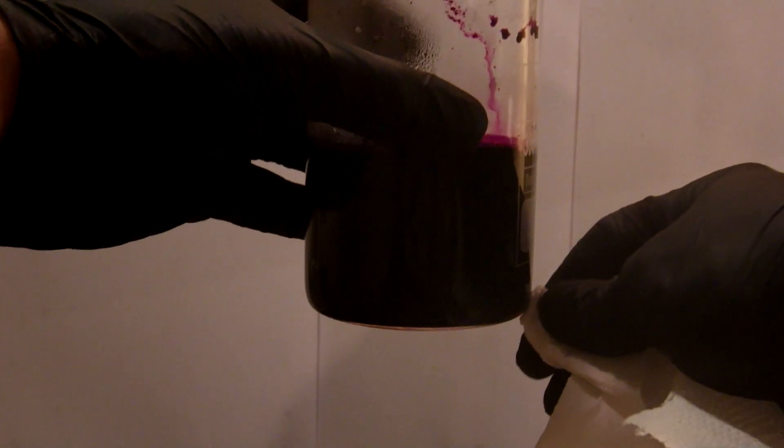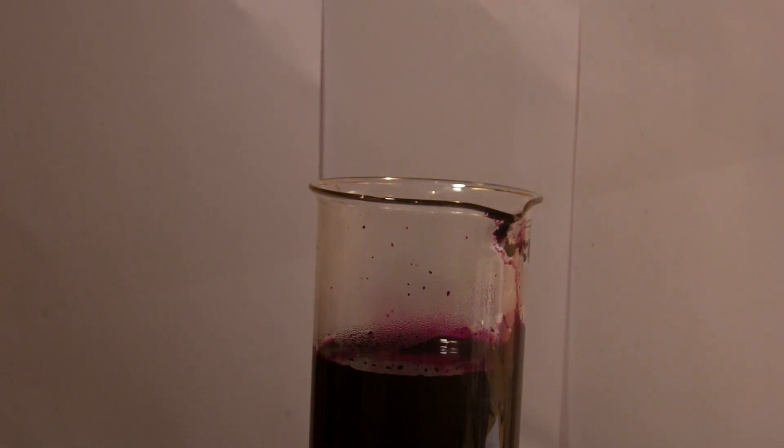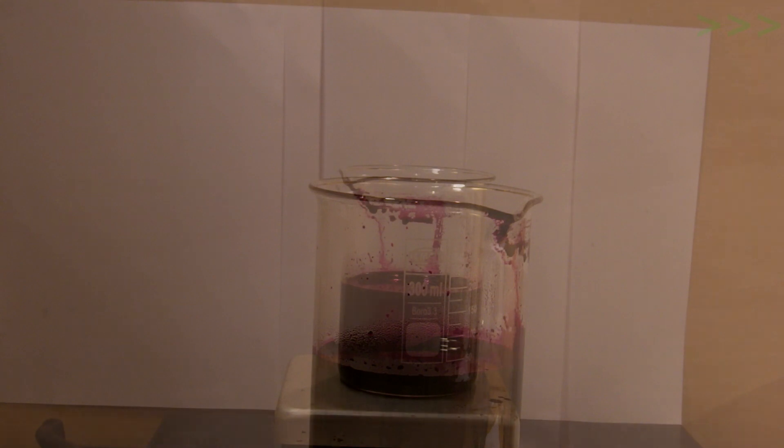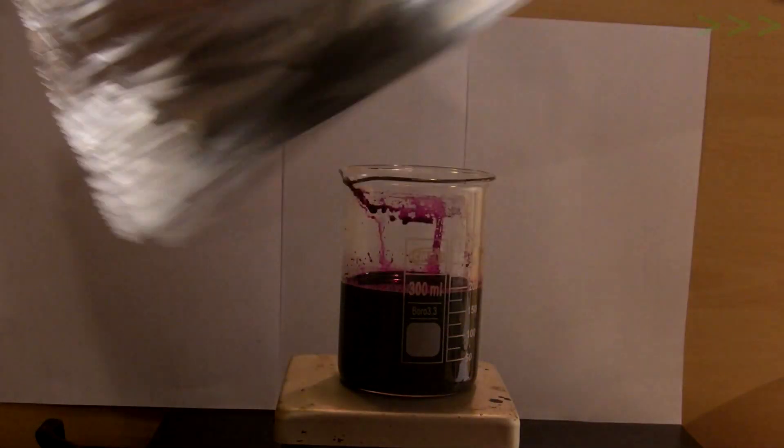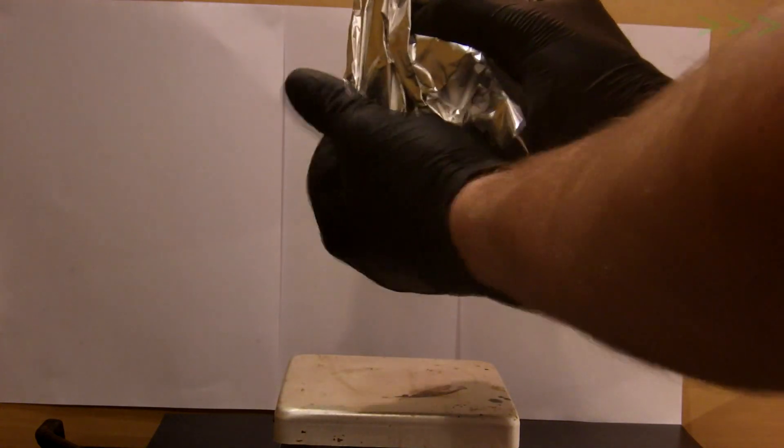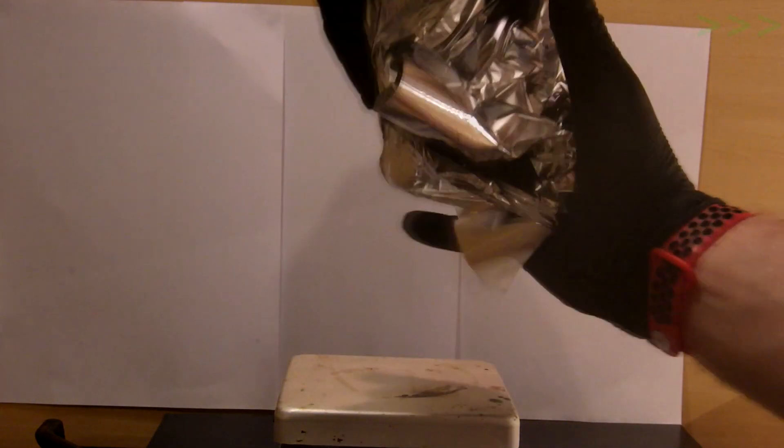Stop and remove stir bar. I then wrapped the beaker in foil, hoping to get larger crystals, but it did not really work this time. I got about the same size crystals when directly putting beaker in freezer.